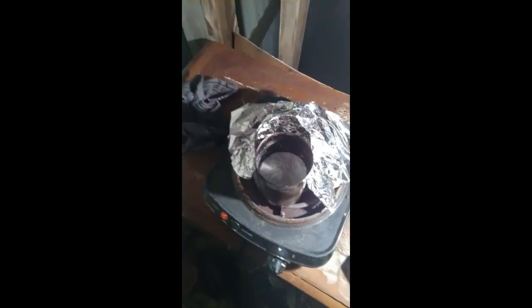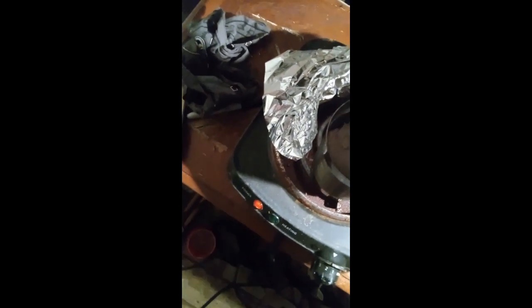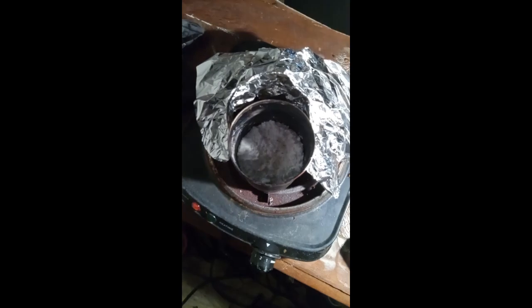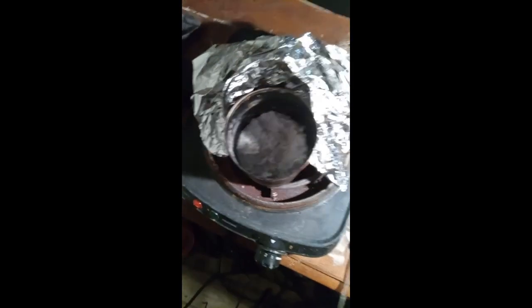Okay, I'm just gonna hold the camera for this, but it's giving off a lot of ammonia. I just wanna give it a look, give it a stir. It's still not liquid yet. It's been a while, but it's liquid underneath. It's giving off a considerable amount of ammonia. It stinks. But all right, we know it's working. That's really all we needed. All right, see you in a bit.